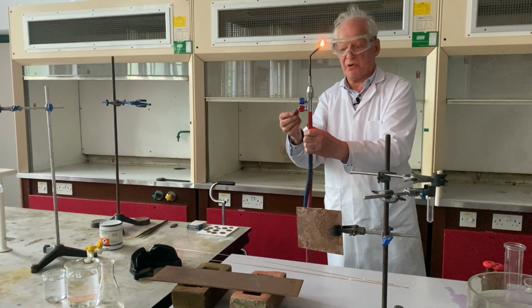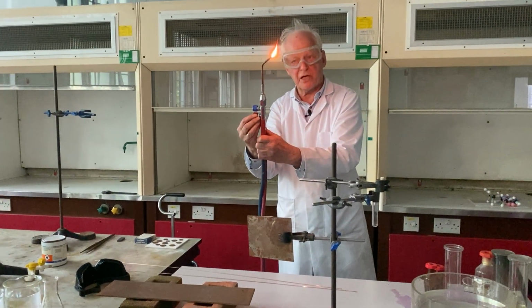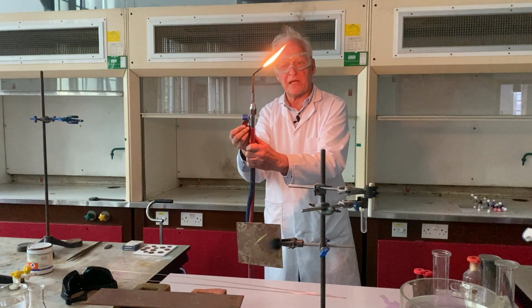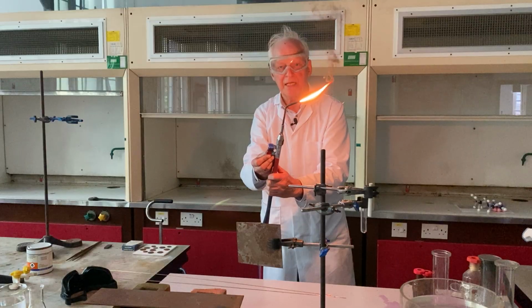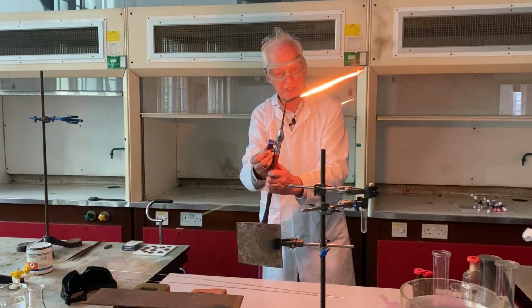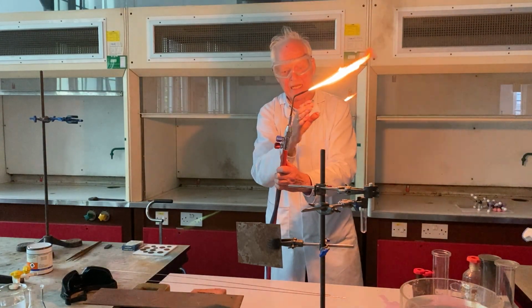Now that's acetylene burning in air, and you will see it has a yellow flame with a huge amount of soot coming off. Obviously, this is incomplete combustion once again, and we can increase the size of the flame gradually. That's what we call laminar flow there, so it's a relatively low speed of issue of the acetylene, but the amount of smoke is seriously large. But that doesn't matter. We have a large ventilated room. So as we increase the pressure of the acetylene, you notice the luminosity starts to increase, and in this area here we have turbulence. So the flame is turbulent, it's laminar up to there.